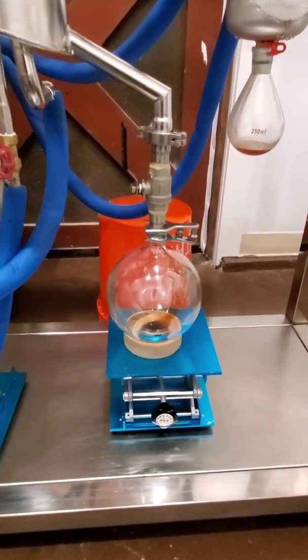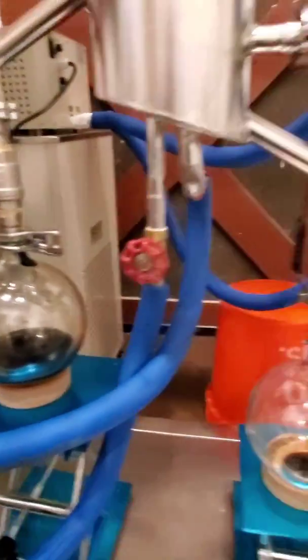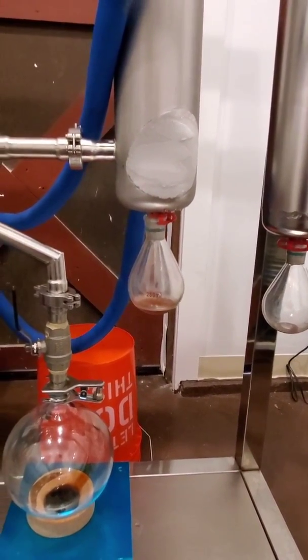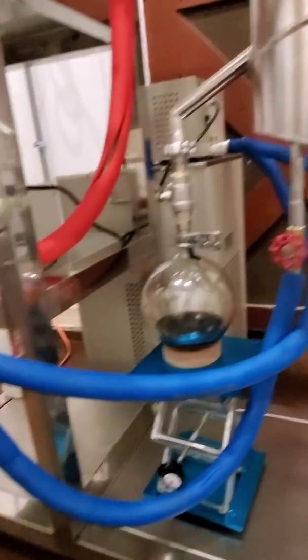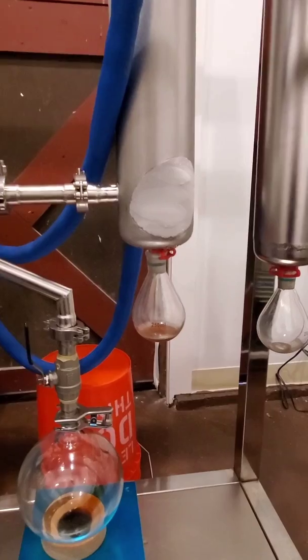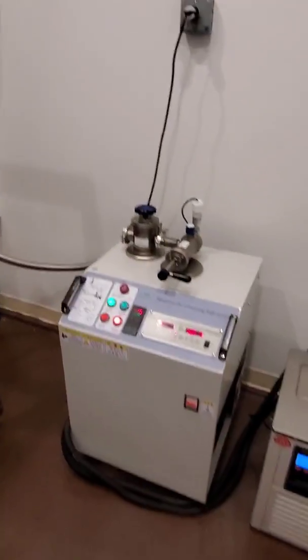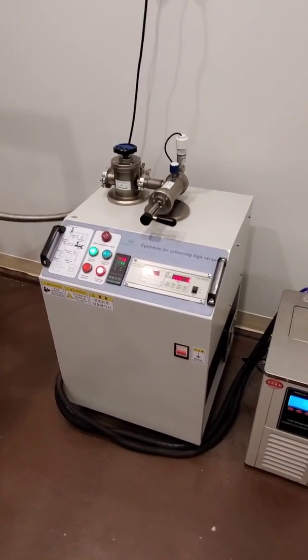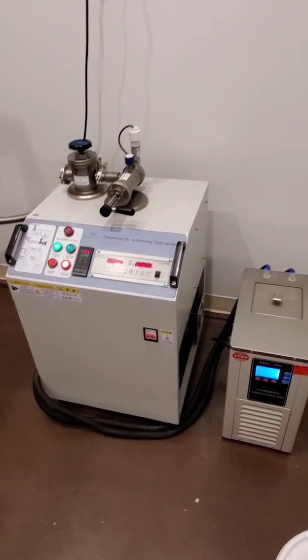What we have right here is your distillate collection flask, and then you have your crude collection flask. Next, we have a cold trap collection flask, which catches any vapors that were not turned into distillate or collected in the crude collection flask. It's really important that those vapors are captured here, because where they go next — if they're not captured — is into the high vacuum pump. If those vapors get into the pump, it can seriously damage your equipment, which eventually shuts down your operation.